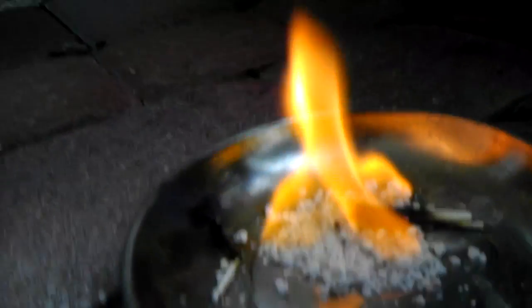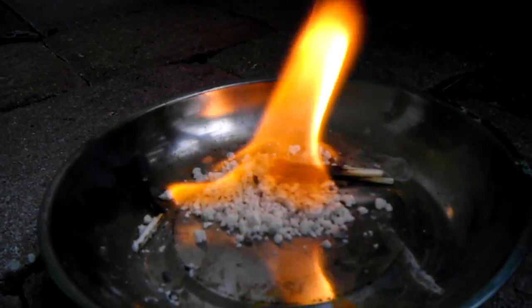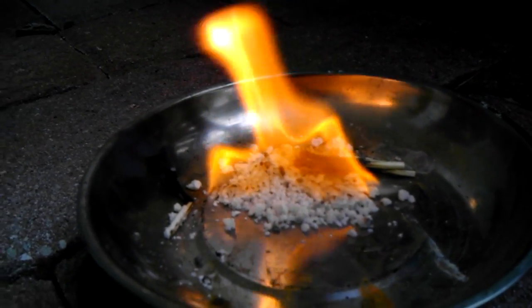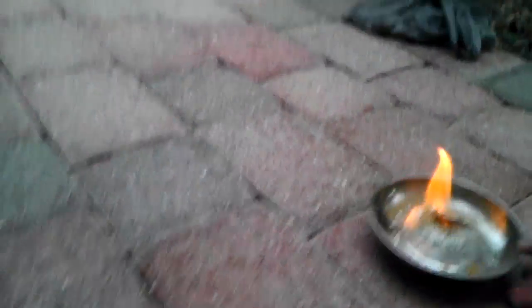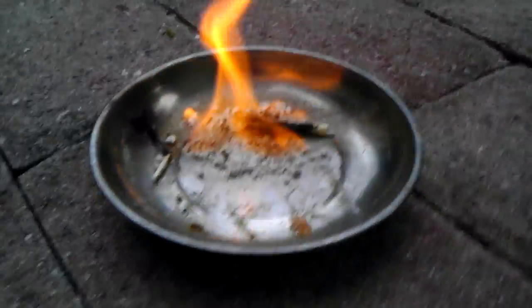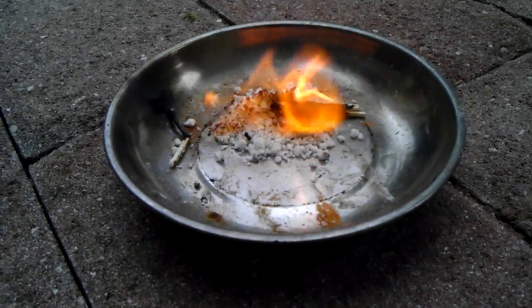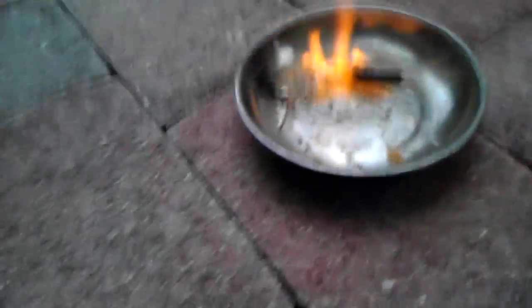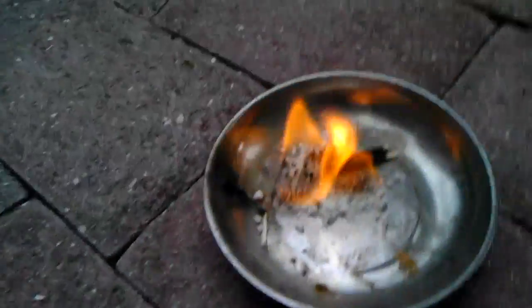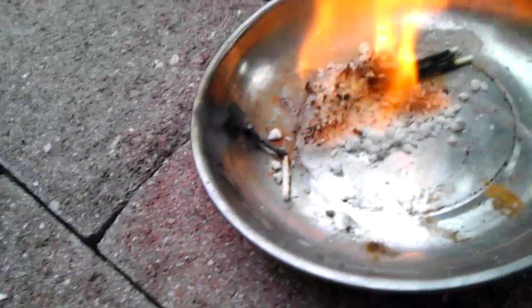That is my final product of hexamine. And you can see it's burning, as it should be. The problem before was it was too wet — couldn't light it with matches, so I had to go with the torch. But yeah, it's a clean burning, hot flame. I can't smell anything coming off of it — no formaldehyde, no ammonia.